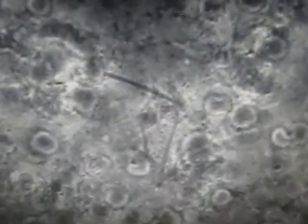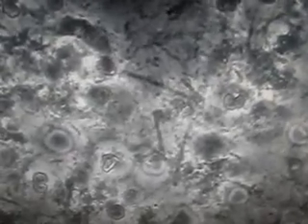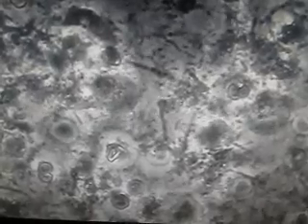We know that they're an extremely active cell — tremendously motile and tremendously aggressive. Most of us don't get a chance to see this unless you spend the money for one of these microscopes, but if you do, you suddenly begin to realize: this is the result of toothpaste. This is somebody who brushed their mouth three times a day with toothpaste.